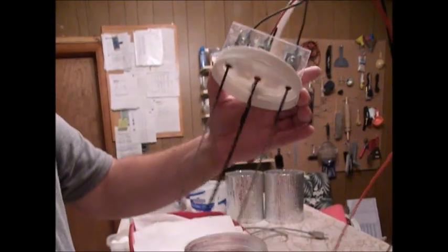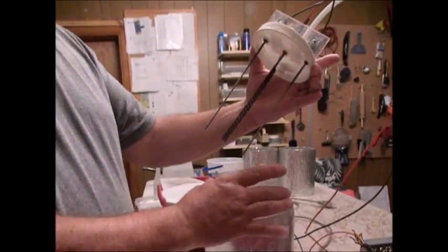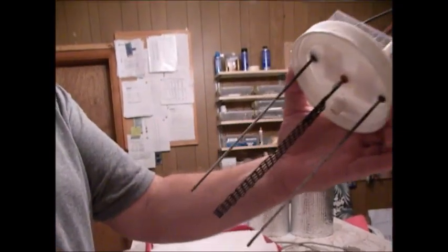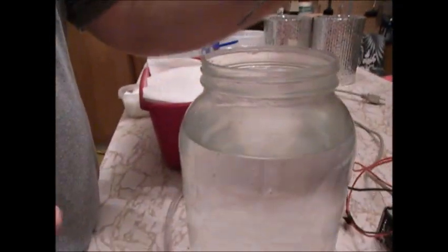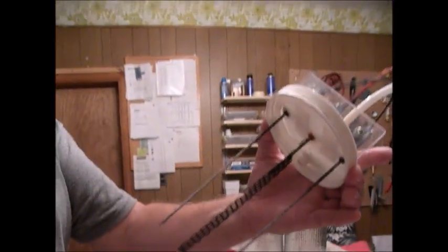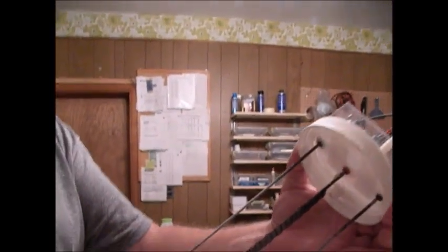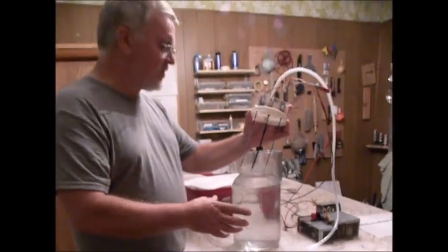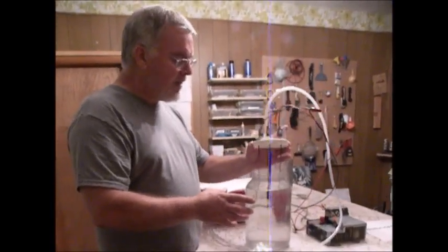If we're up and running, it just percolates, it bubbles in there - that's how you know it's working. But when I would take this off and filter out my finished product, I got flaking from these electrodes and I got some contaminants in there. I found that when I ran it at a lower temperature, about 140 degrees, I got very little erosion in the bottom of it.